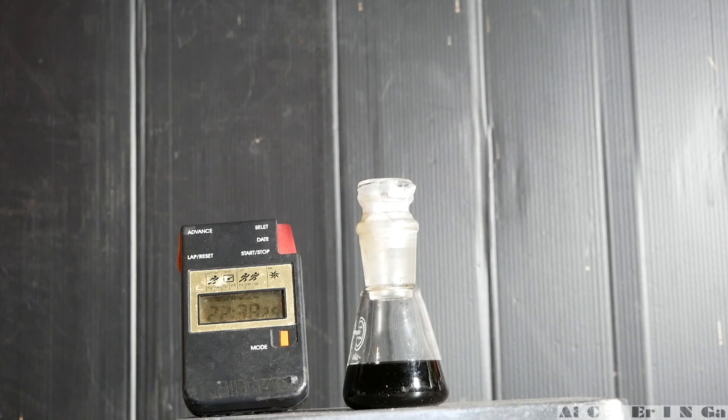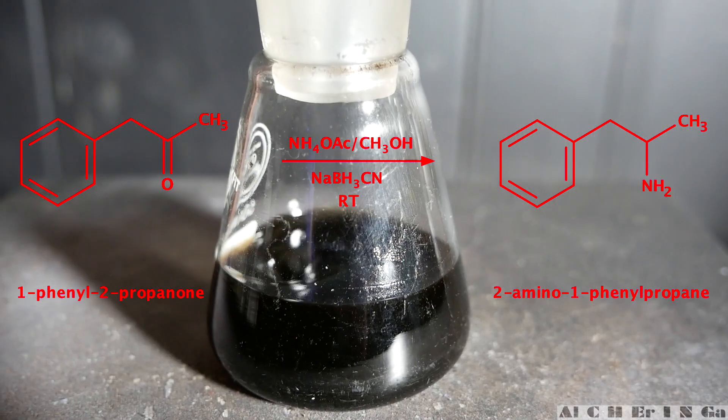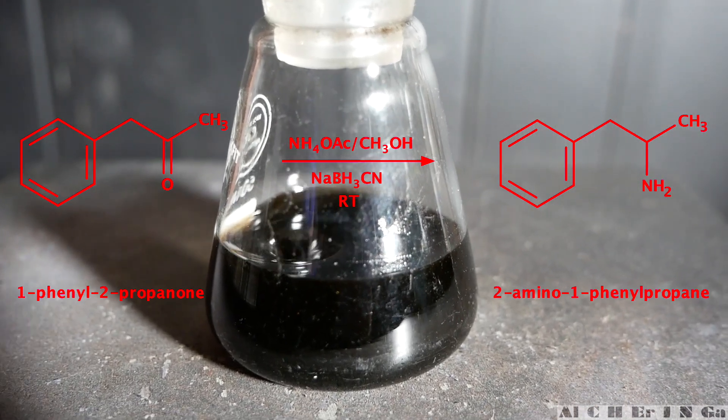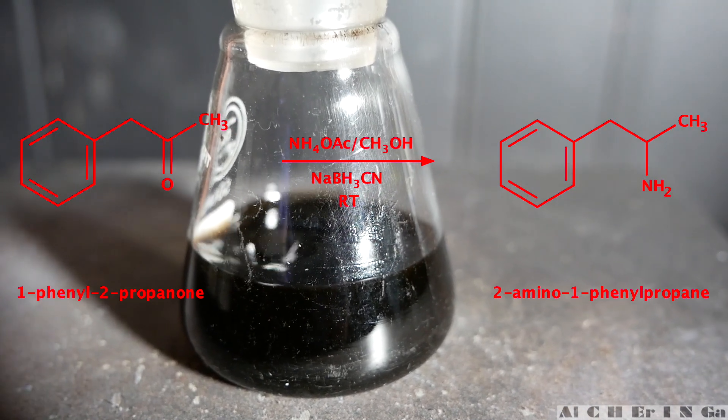Okay now, let's have a look at the chemistry. 1-phenyl-2-propanone dissolved in a mixture of methanol and ammonium acetate react in the presence of sodium cyanoborohydride at room temperature to form 2-amino-1-phenylpropane. This is a reductive amination reaction.